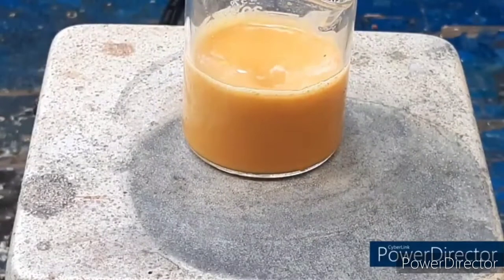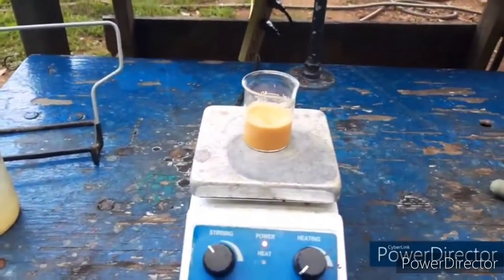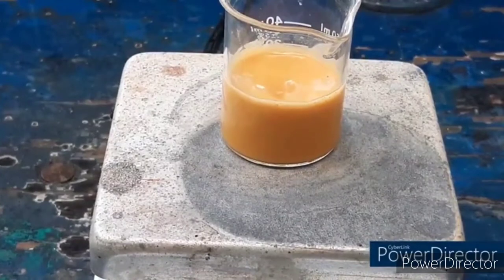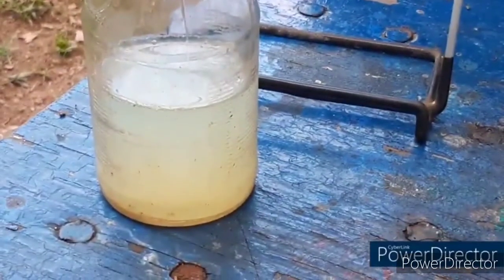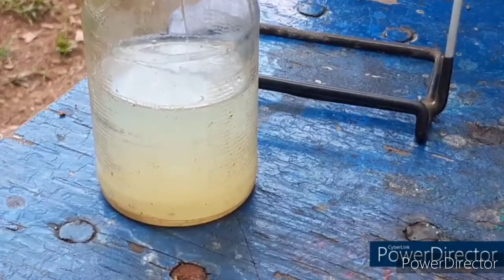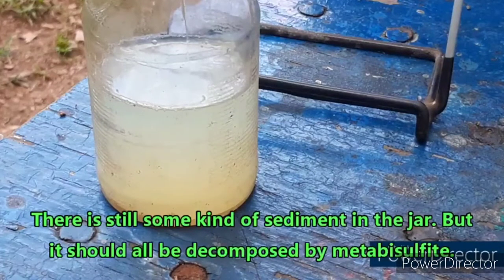This is our fulminating gold. I have rinsed and decanted it many times — you can see the volume of liquid that came out; that container was empty when I started. For the gold recycling batch I had over here, rather than risk having explosive fulminating gold in there, I reacidified the solution with nitric and hydrochloric acid, which seems to have dissolved it all. It'll be very easy to re-precipitate the gold out with metabisulfite.